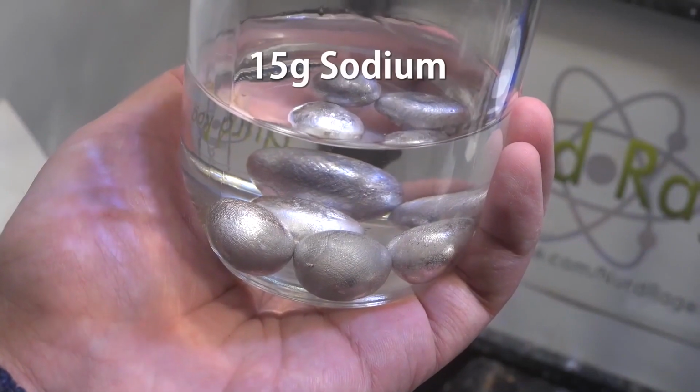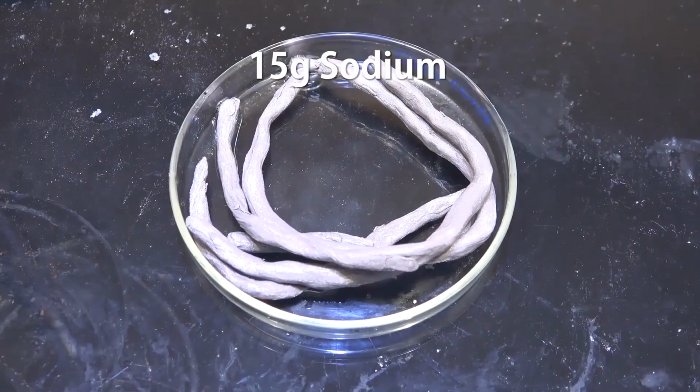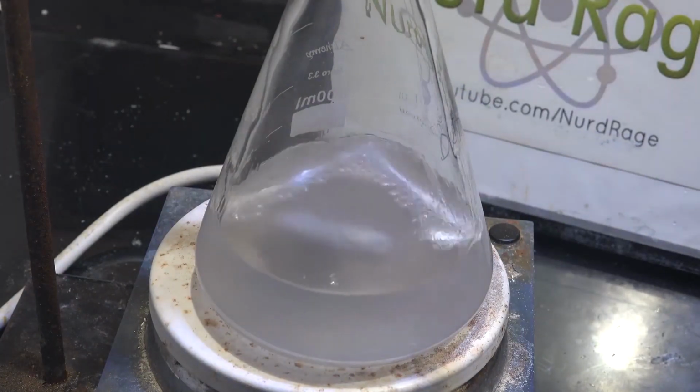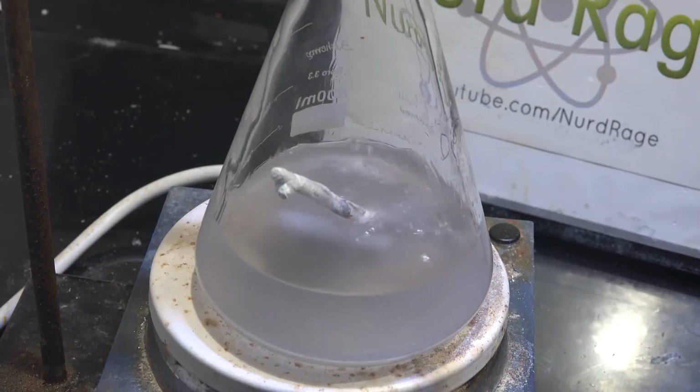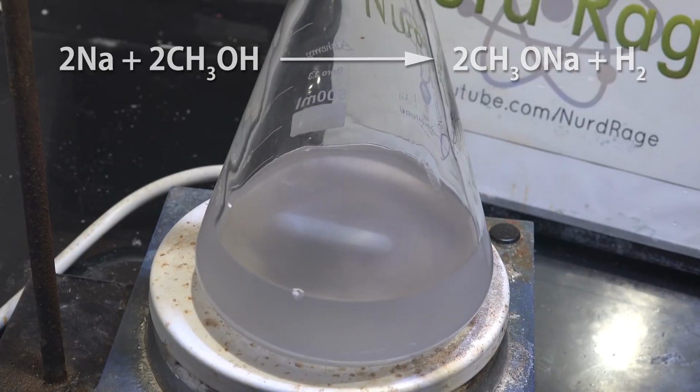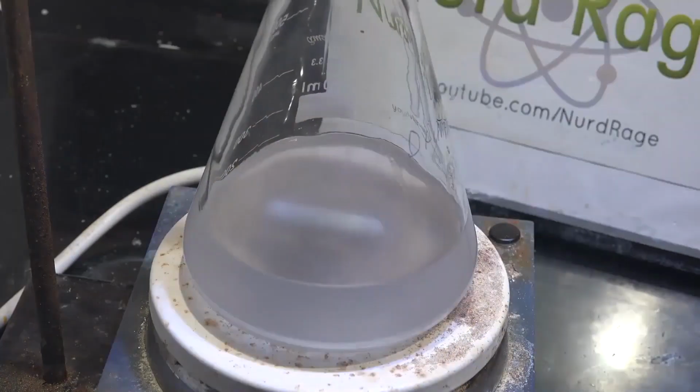Now get 15 grams of sodium metal that we made and rolled into wires. Add them through the top of the reflux condenser a little at a time and keep the reflux under control. What we're making is sodium methoxide and methanol solution. Once it's all added and cooled, take off the reflux condenser.